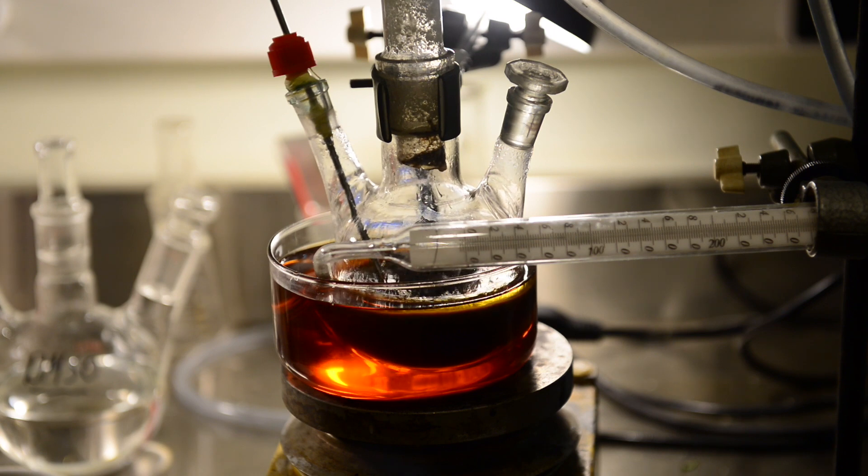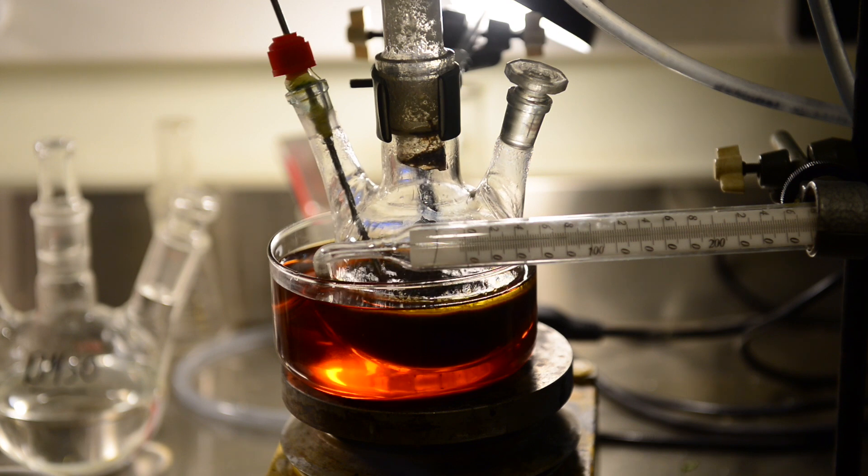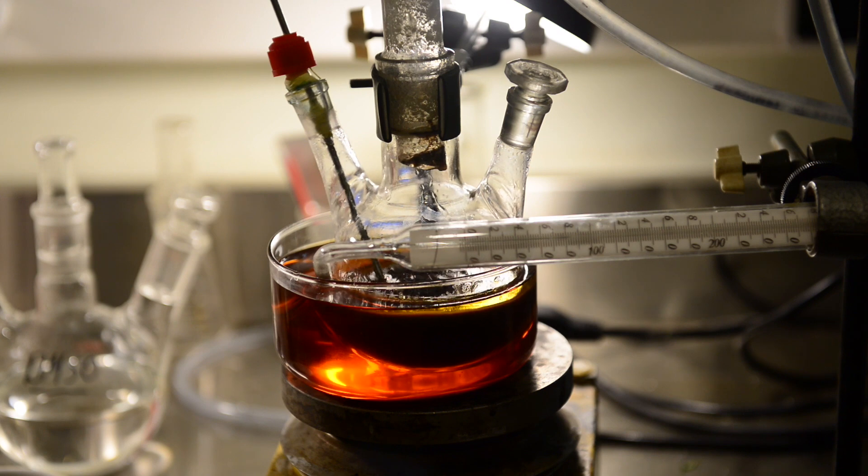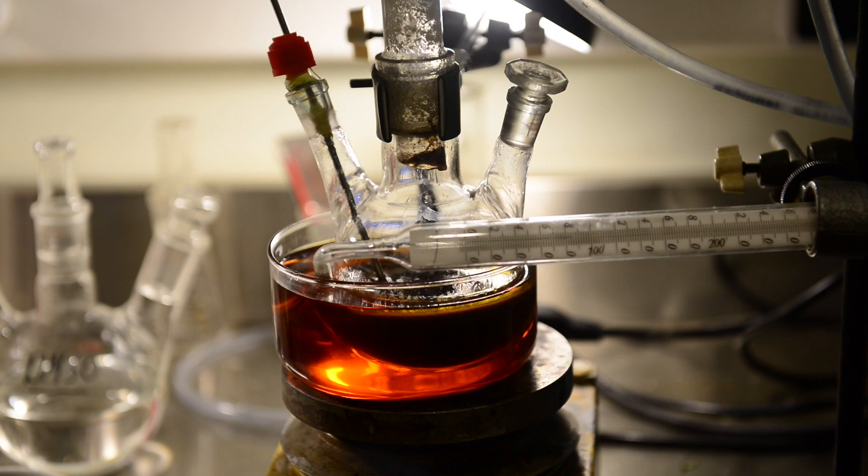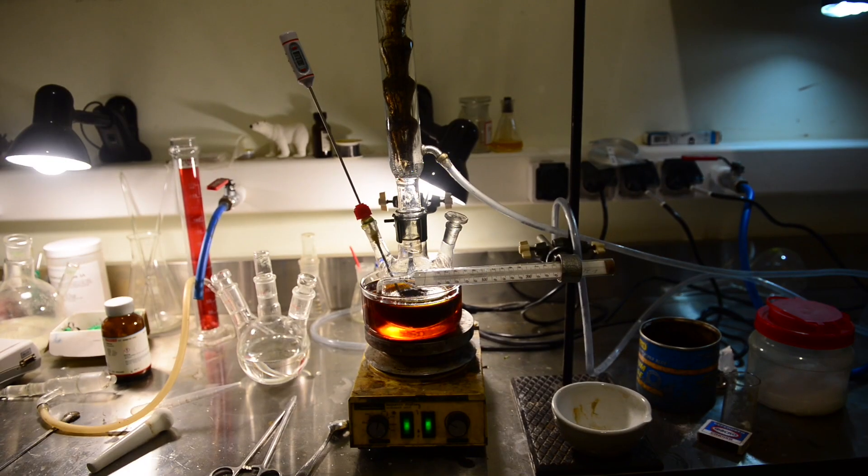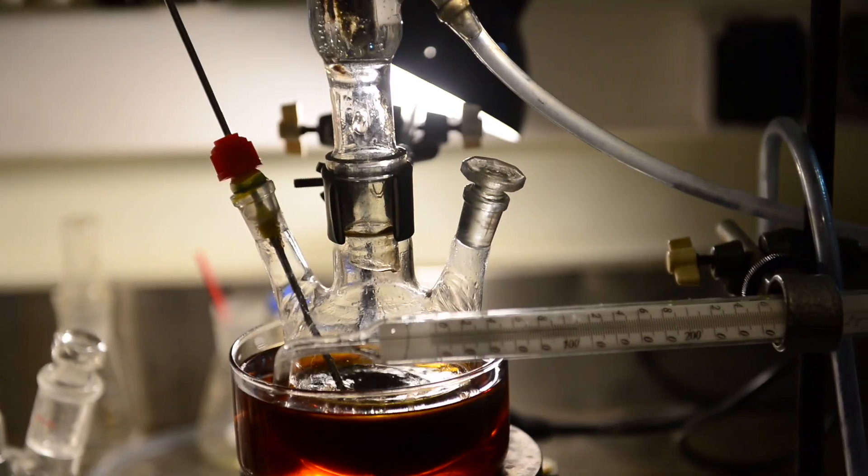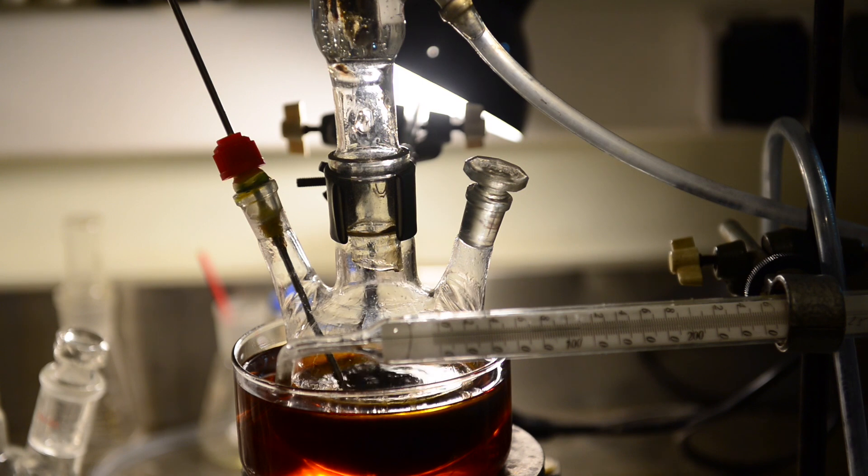We are adding what is left from the reactants. After each addition of the catechol, vigorous boiling is observed. In the end we rinse condenser and funnel down with 3 milliliters of dichloromethane and 20 milliliters of DMSO, but still too much catechol is stuck on the walls. We hope the reflux will rinse what has remained.